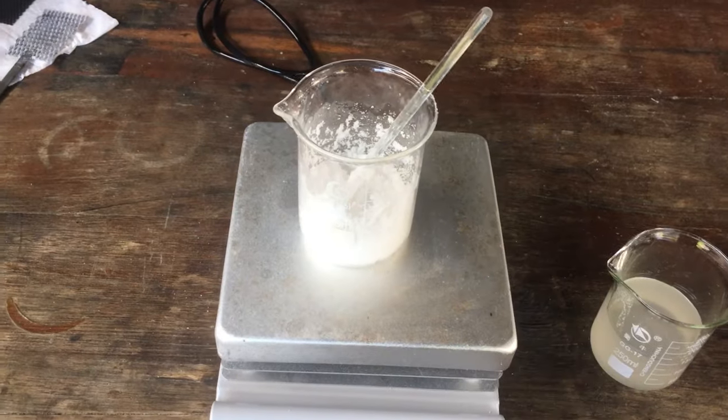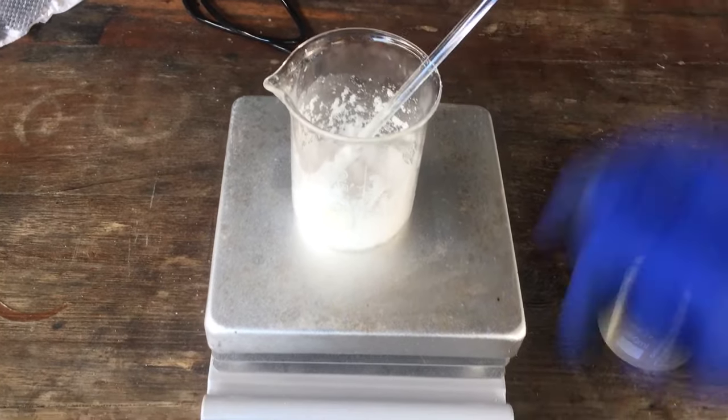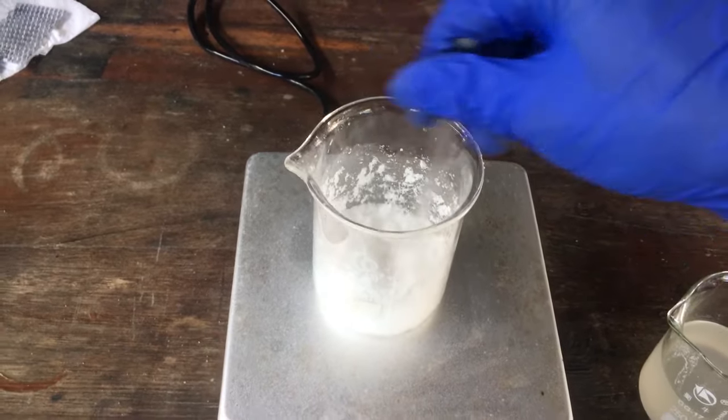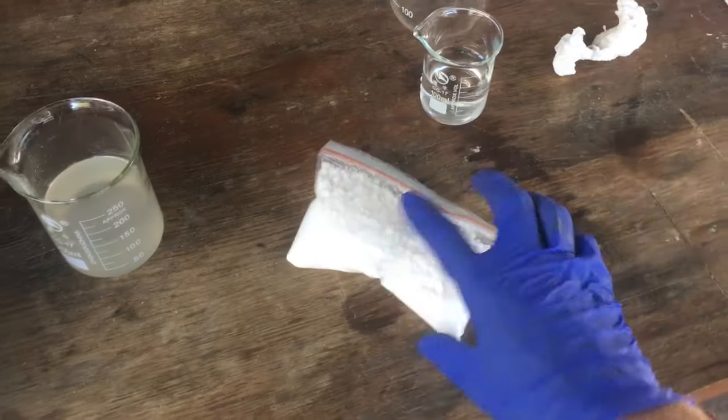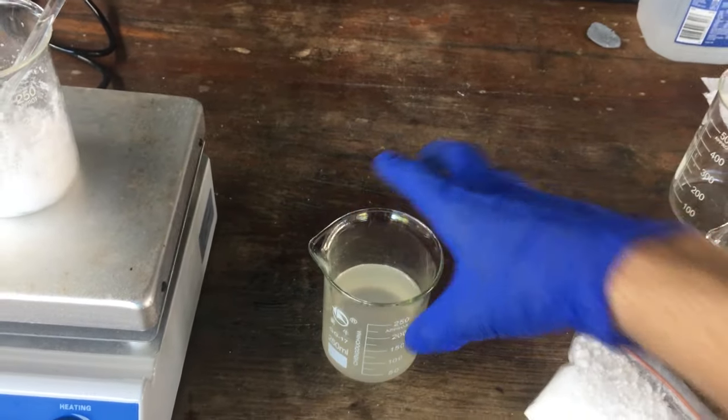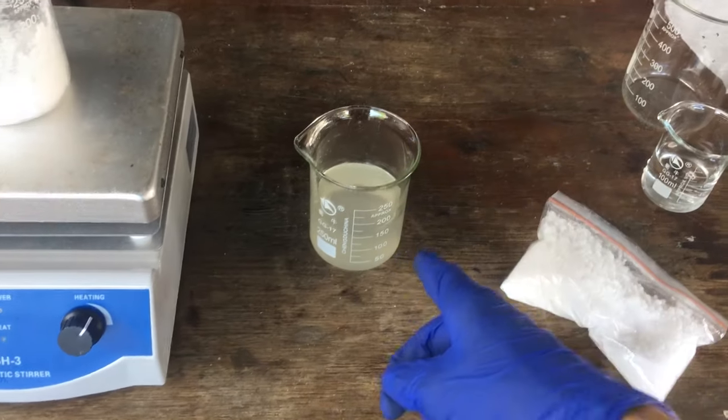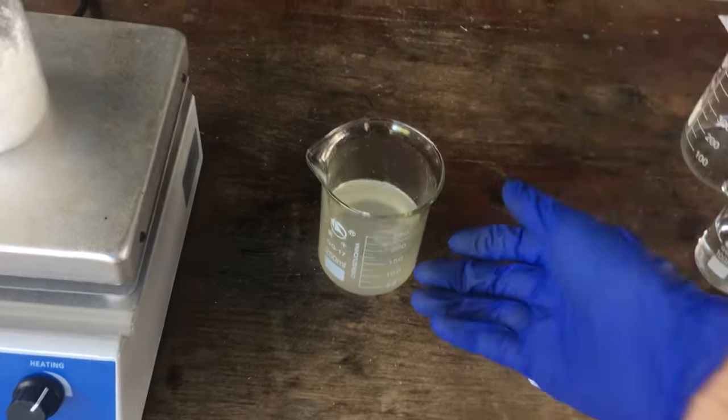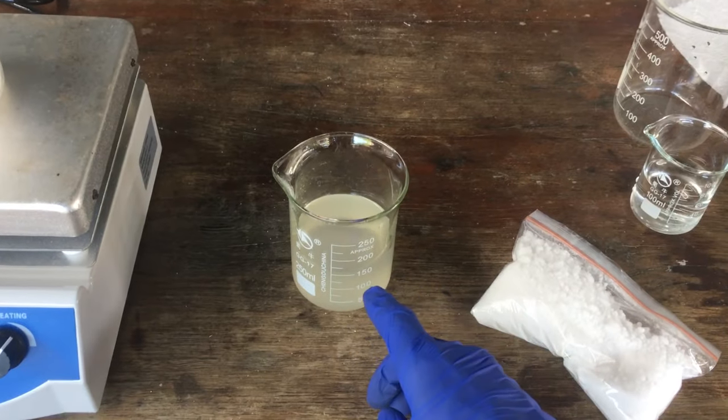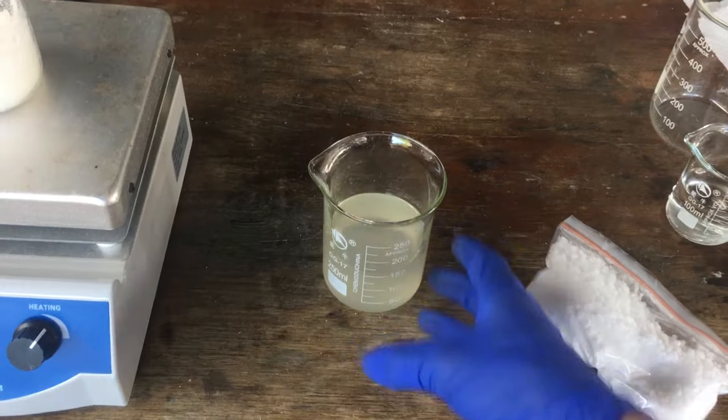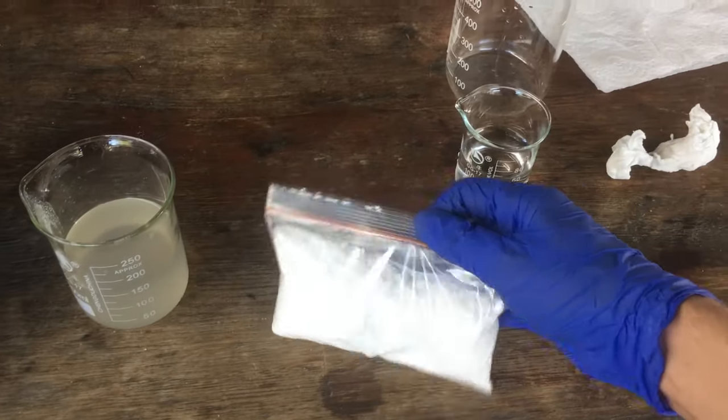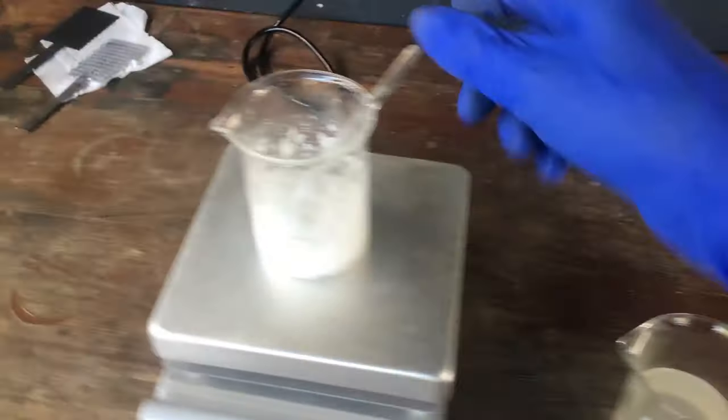As you can see, to dry the crystals, all I've done is just put them all in a beaker on the hot plate and we're heating them to, I don't know, around 150 celsius. What this will do is drive off all of the water from the crystals. This is what I did as well for the first batch. Also, while I could probably boil down our remaining solution a little bit more and crystallize out even more sodium chlorate, I don't think I'm going to do that because there's not really all that much left in here, maybe a maximum of 80 grams total. And also, once we start boiling down past this point, there's probably going to be a small amount of sodium chloride crystallizing out as we reduce that volume, which we don't want. So I'm just going to discard this solution and our yield is going to be what we got in the first round and what we have here.